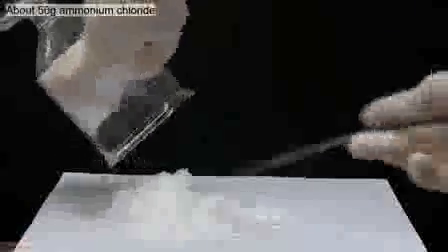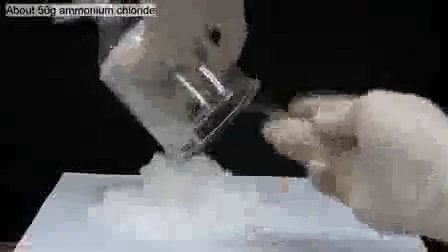As usual, after everything's dissolved, we let it sit at room temperature and the crystals start to come out. When it's cooled down to about room temperature, I put it in the freezer for a while, and then I filter it off. What we're left with is actually quite pure, fluffy white ammonium chloride. I also dried the ammonium chloride under vacuum, and the final yield is about 50 grams.